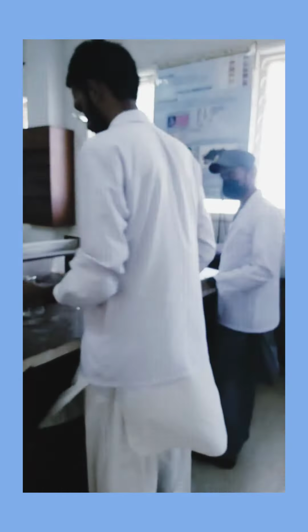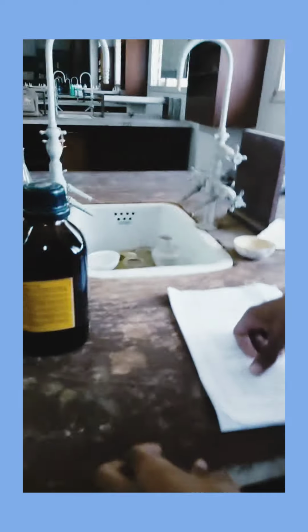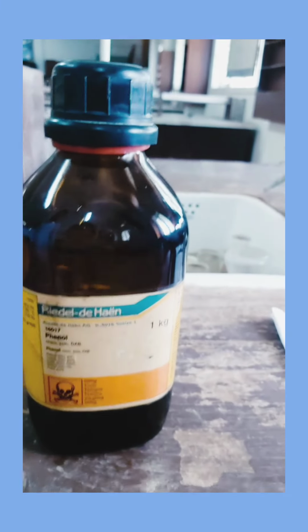So this is it. A whole bunch of girls are here and the boys are over here. I can show you that they are also measuring, and they are also doing it in a small group. These are the boys who are doing it. What is this bottle? No, phenol. Phenol, okay. This is phenol, and I think it's a new bottle. That's good. At least now you have a new bottle of phenol.